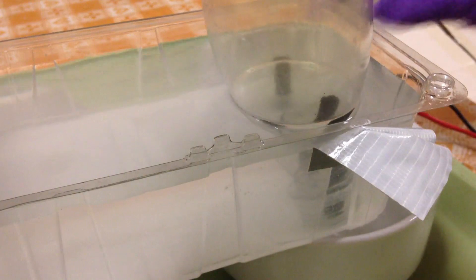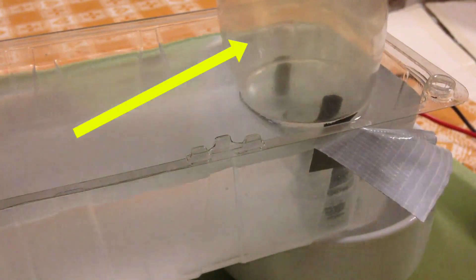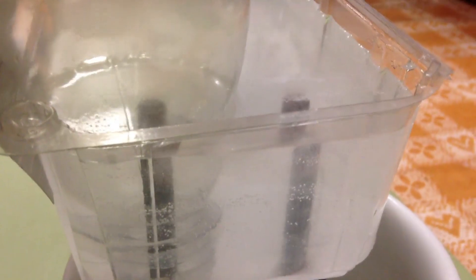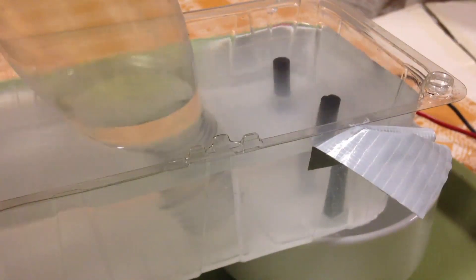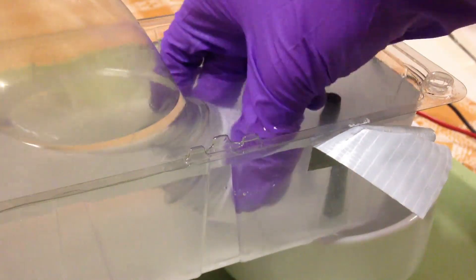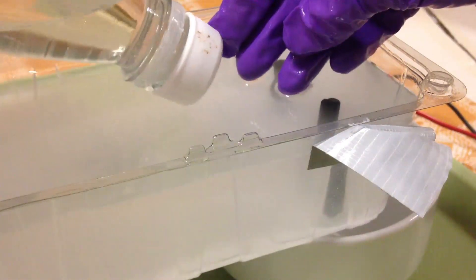Now for the experiment. Once your bottle is filled up with chlorine like this, make sure you have a little bit of water inside the bottle. Disconnect the power supply and put gloves on your hands. Then slide the bottle down from the rod like this and leave the bottle inside the water. Then secure it with the lid, and when you close the bottle you can take it out of the water. As you can see our chlorine has a nice yellow color.